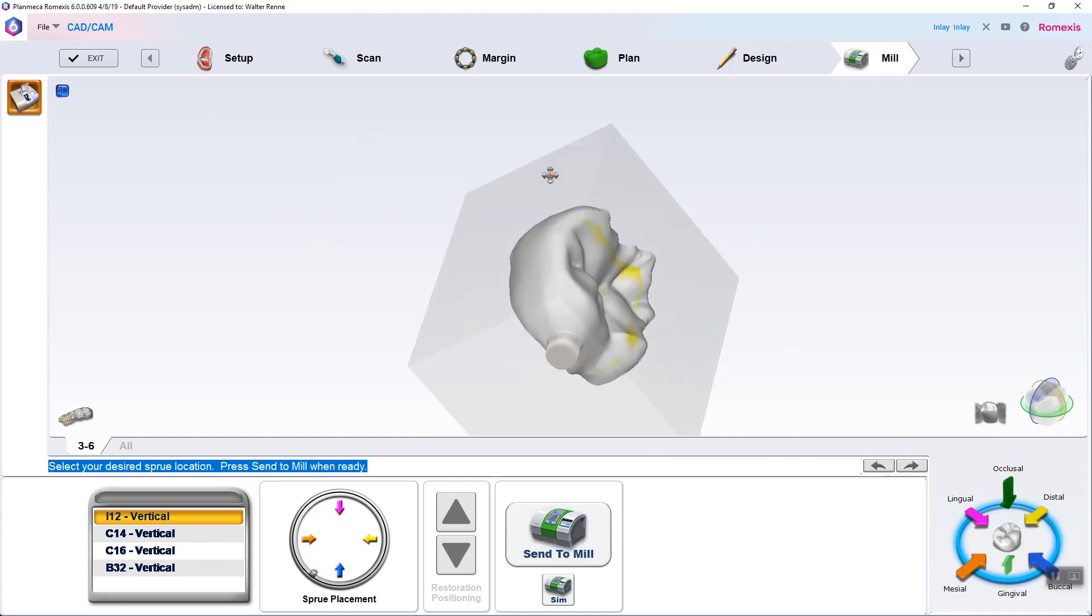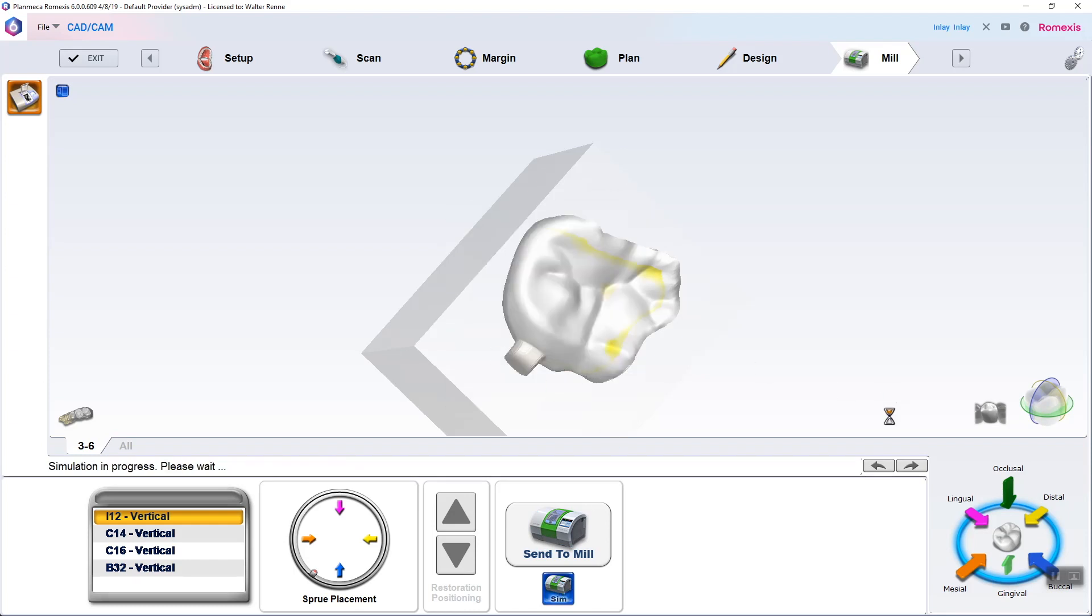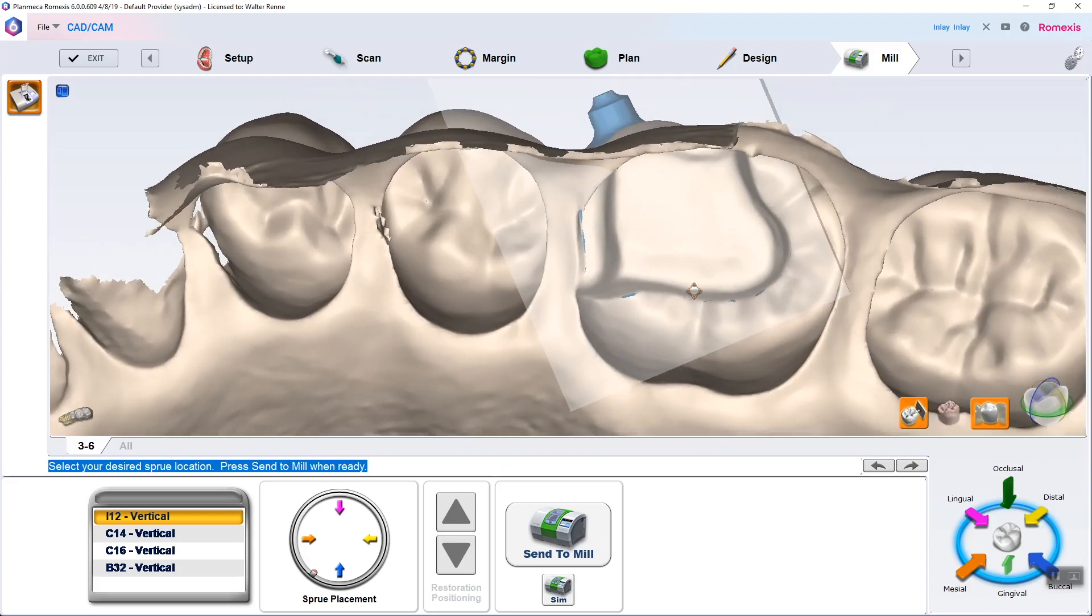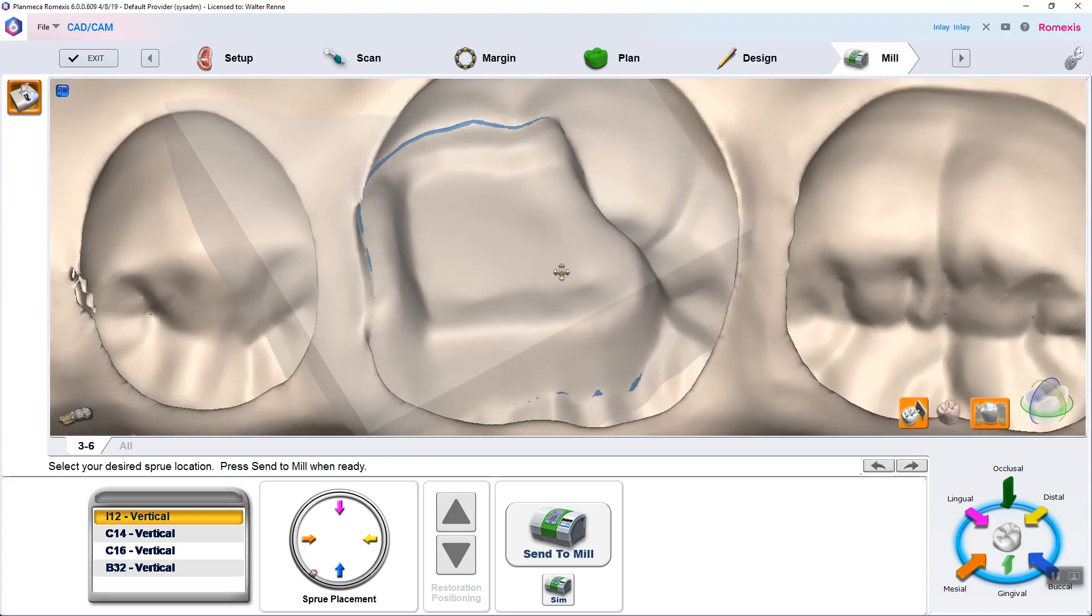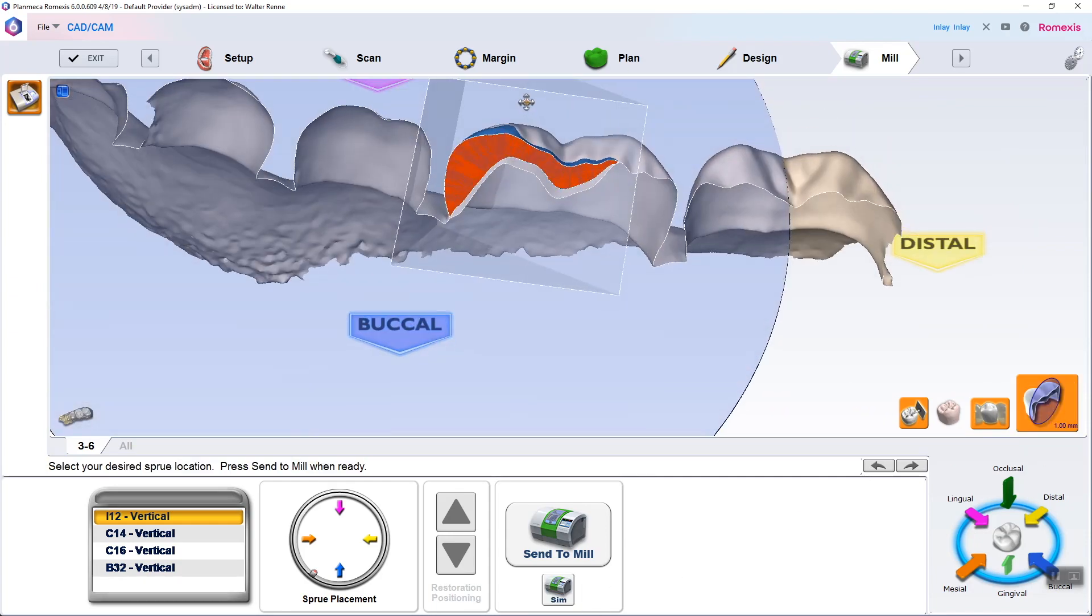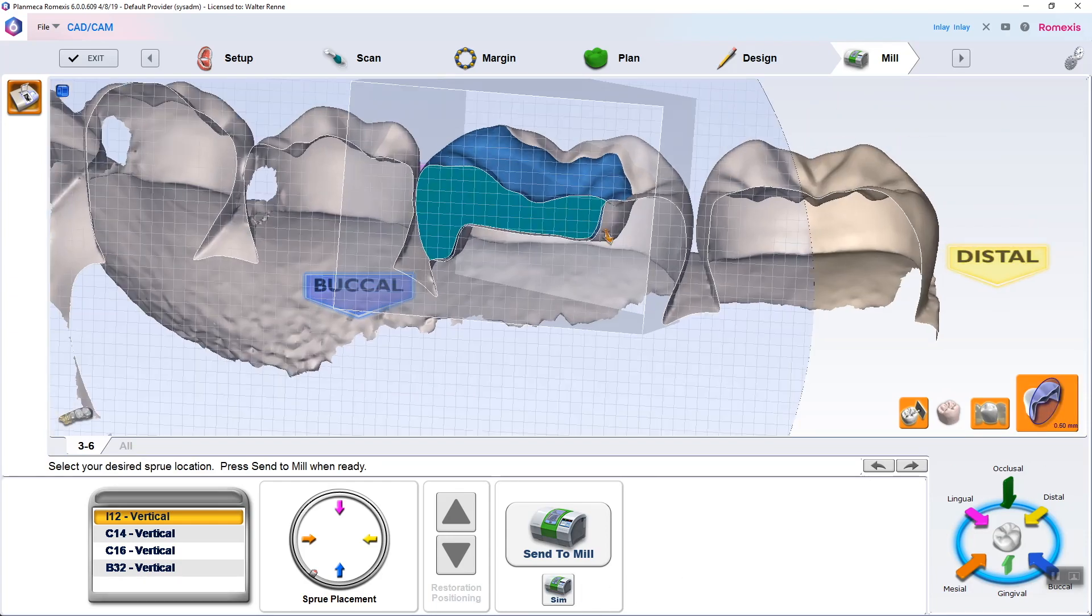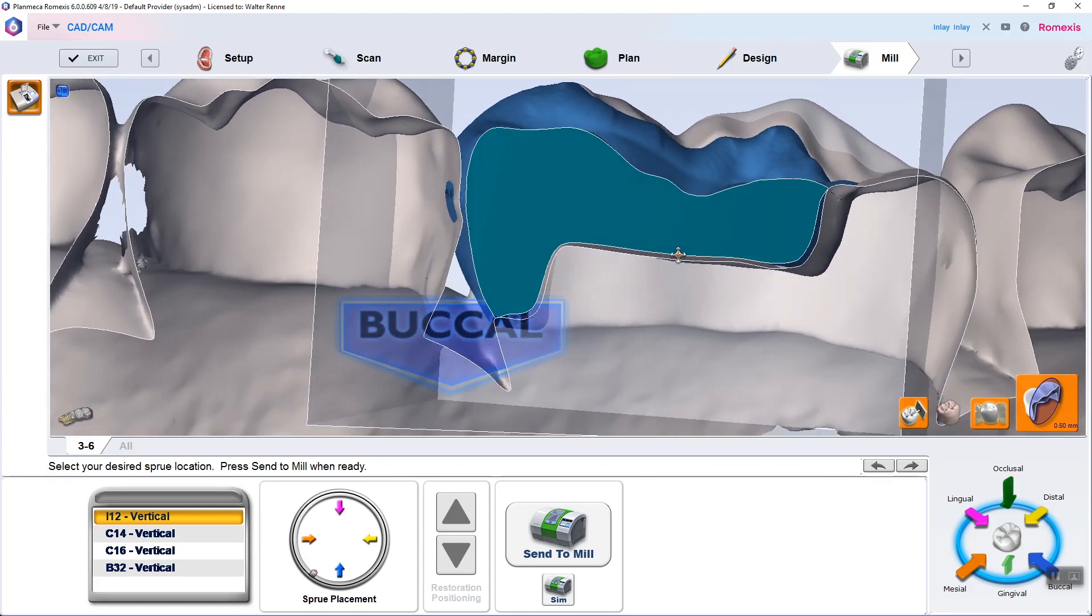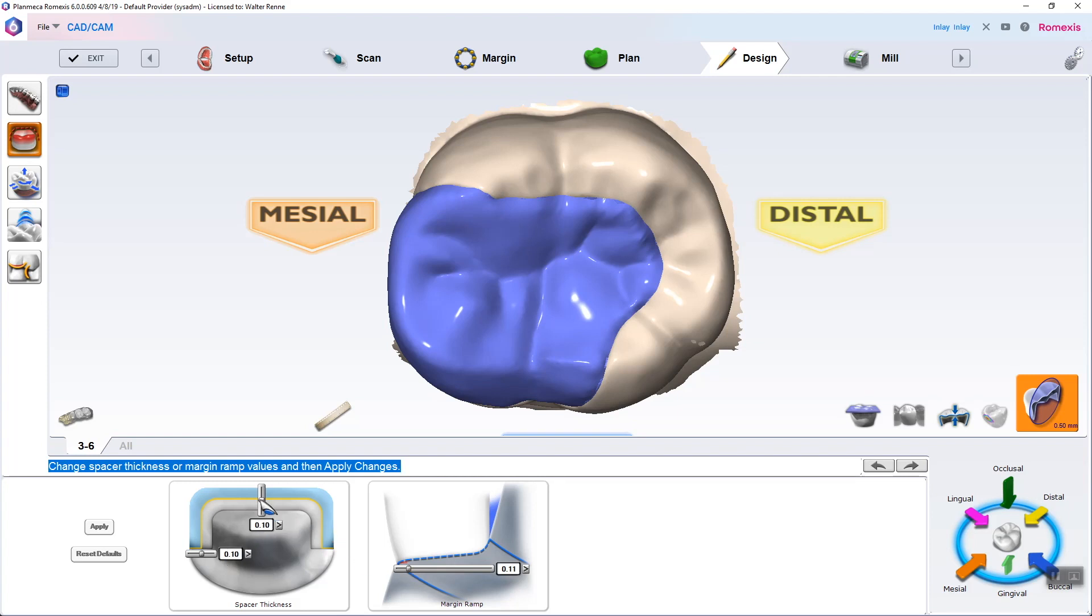Off to the mill tab, moving that sprue using the compass to a position that you like, and then simulating this in detail mode first. Looking down from the underside, you should see a semi-distinct blue line all the way around the margin, or almost coincident all the way around the margin. And here we could see the cement space on detail mode is wicked thin. I like it, but I'm going to go ahead and decrease my margin ramp. I like my margin ramp to be around the 0.1 for inlays and onlays. And I'm going to boost my cement space a little bit for this onlay as well.